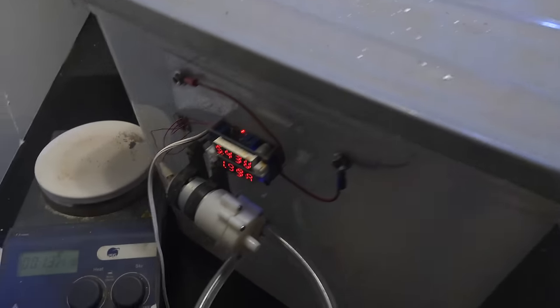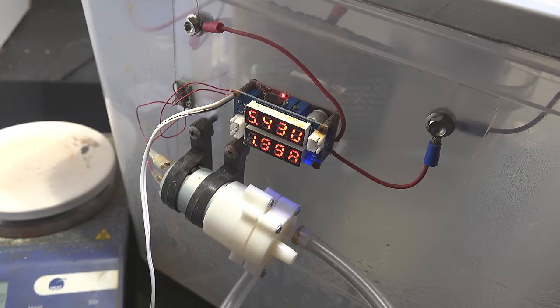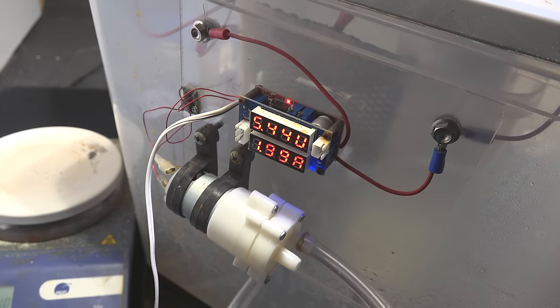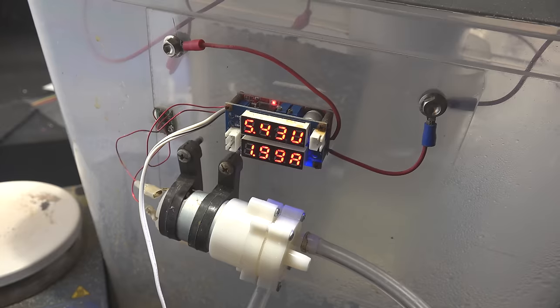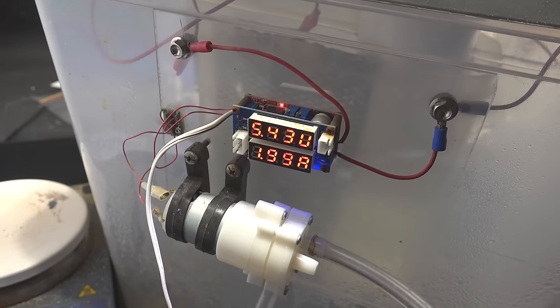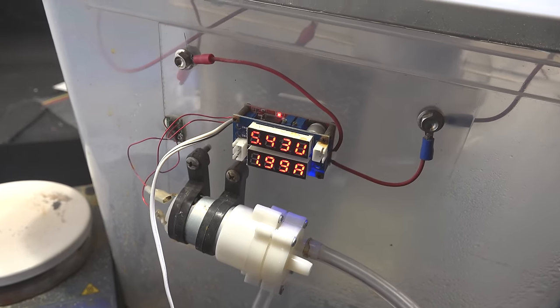It is now 40 days later and we're going to harvest our yield of potassium chlorate. So here is the cell. Current is still flowing and the voltage hasn't risen significantly. So our electrodes are likely still good and there hasn't been much damage to the electrodes. Let me open it up.